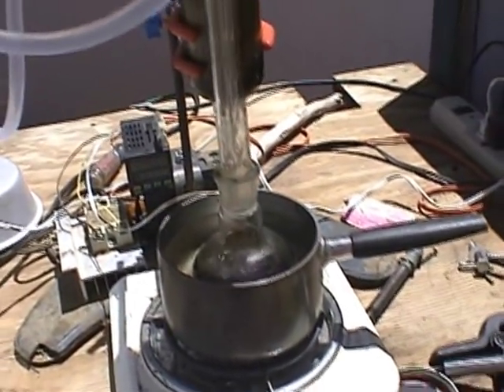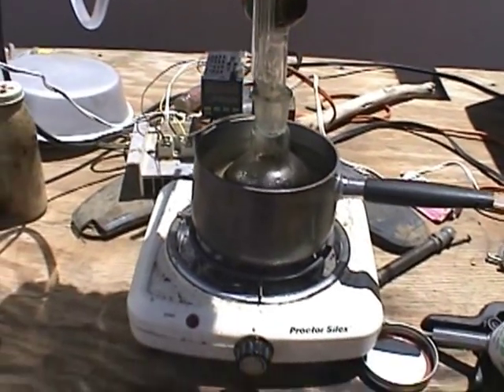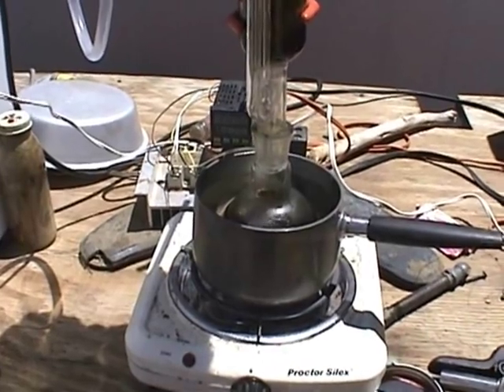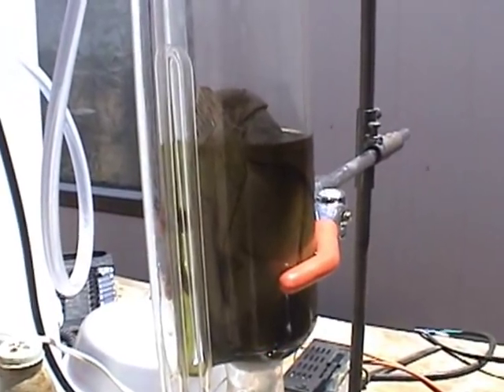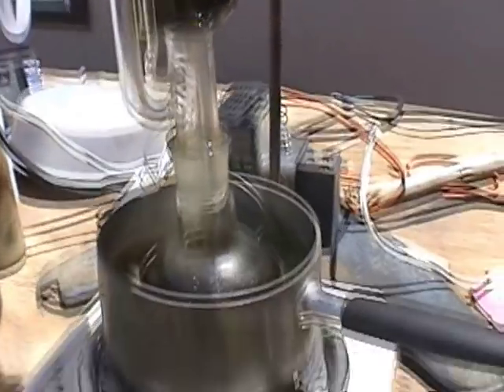I then liquefy it with alcohol in suspension so it becomes sprayable. Then I add some DMSO and a little peppermint for a cooling effect — and voilà! It's very effective. You can see the material — the solvent — is quite dark. After it's cycled again back to the point where it's nearly clear, that load will be finished.